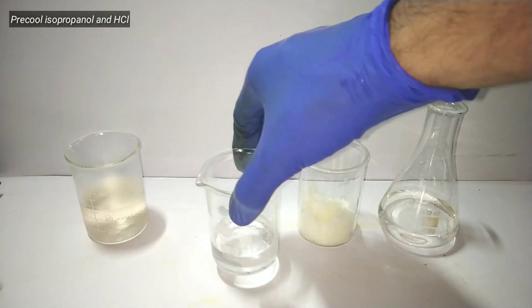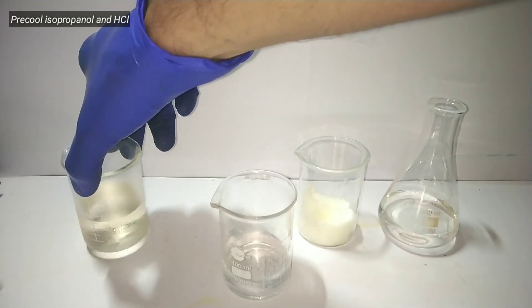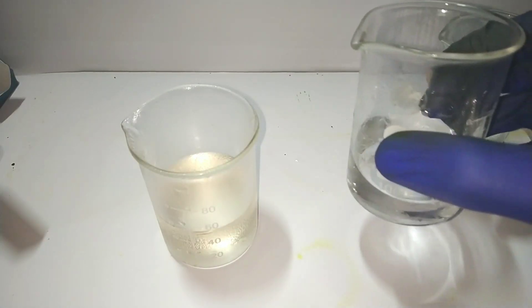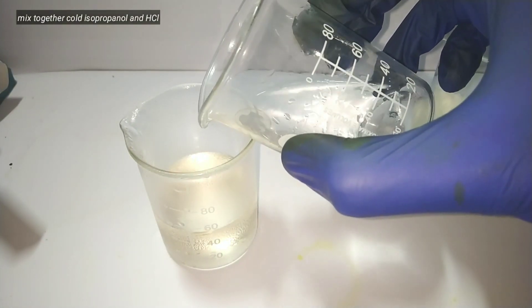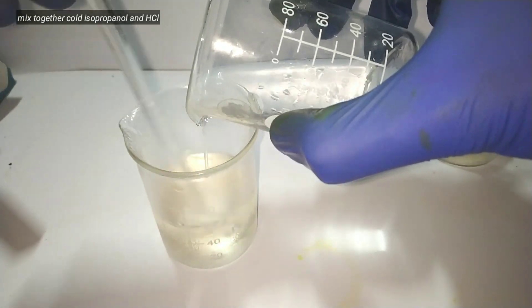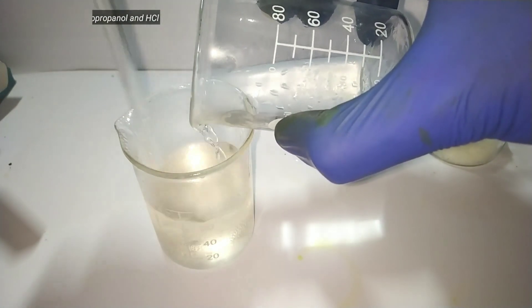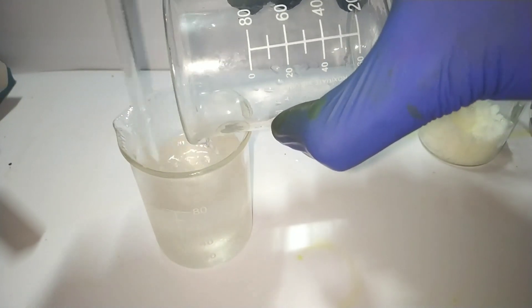First of all, we keep both the isopropanol and hydrochloric acid in the refrigerator for cooling. After cooling, we mix them together, using a glass stirring rod and continuously stir while adding the alcohol to the acid.